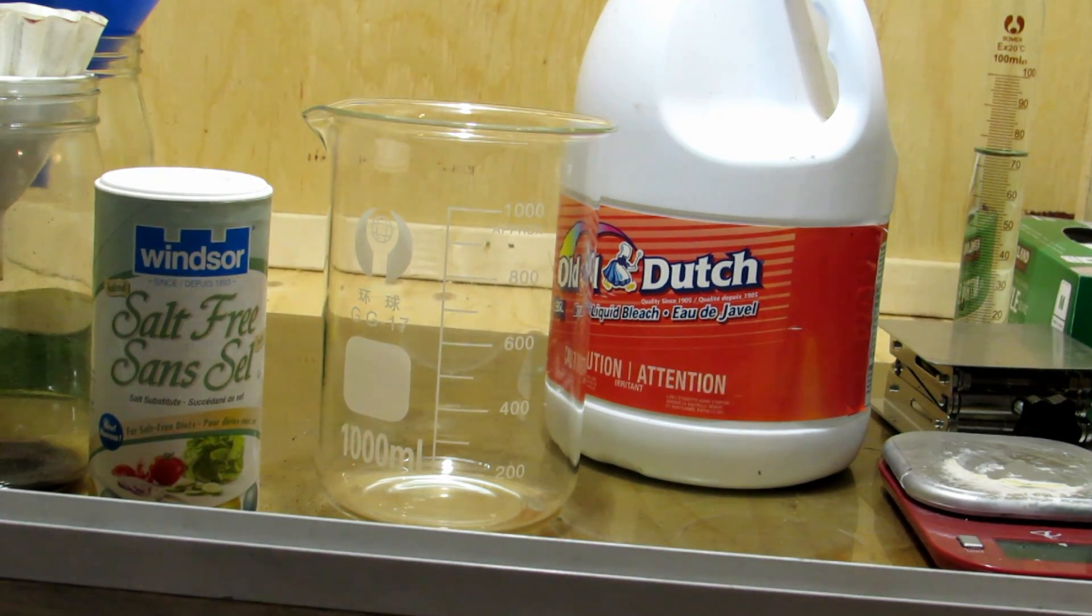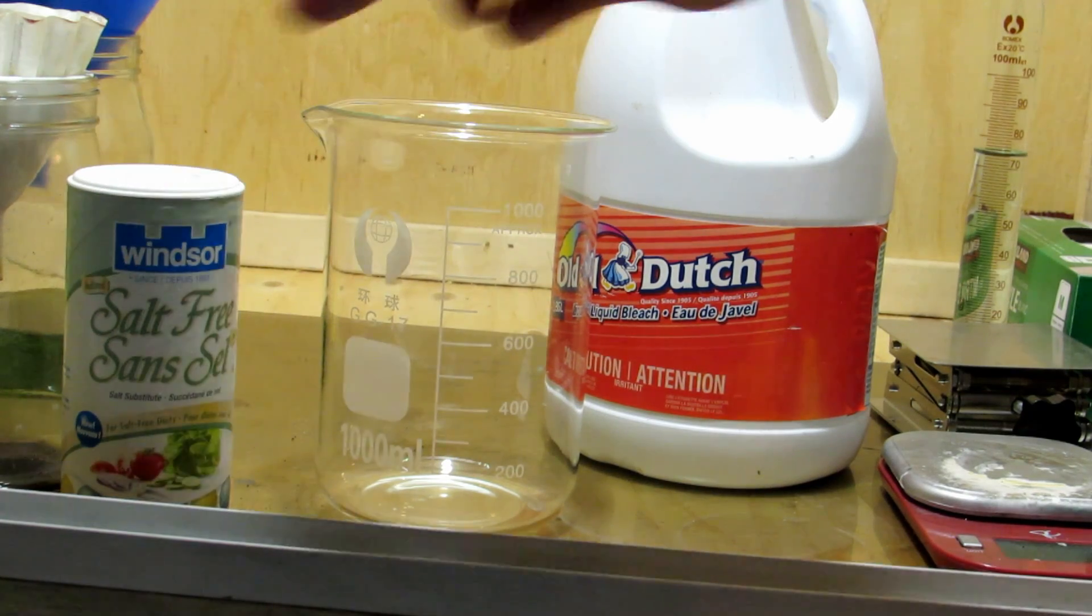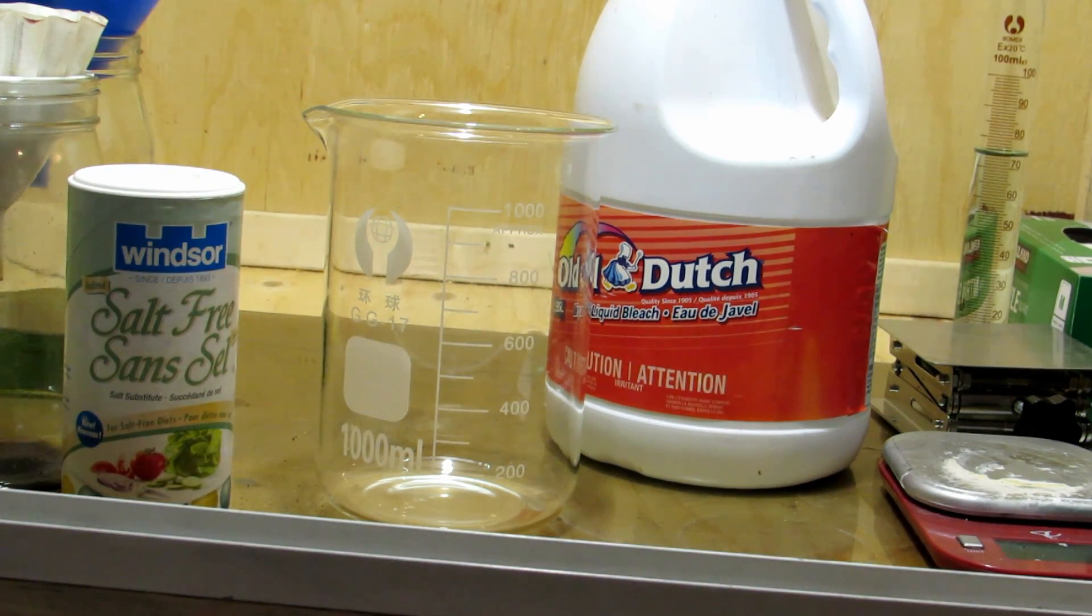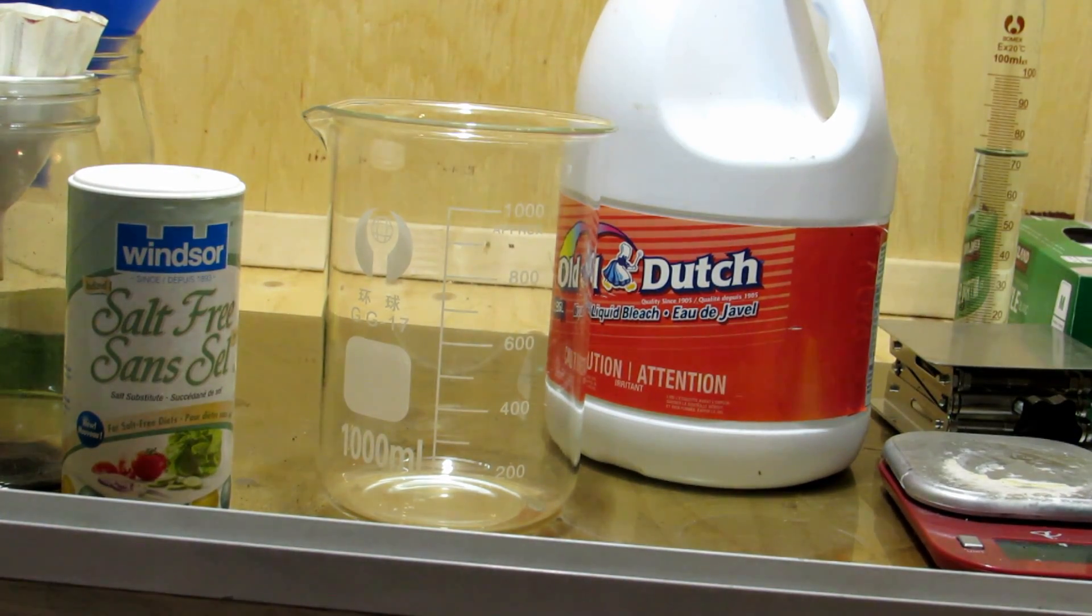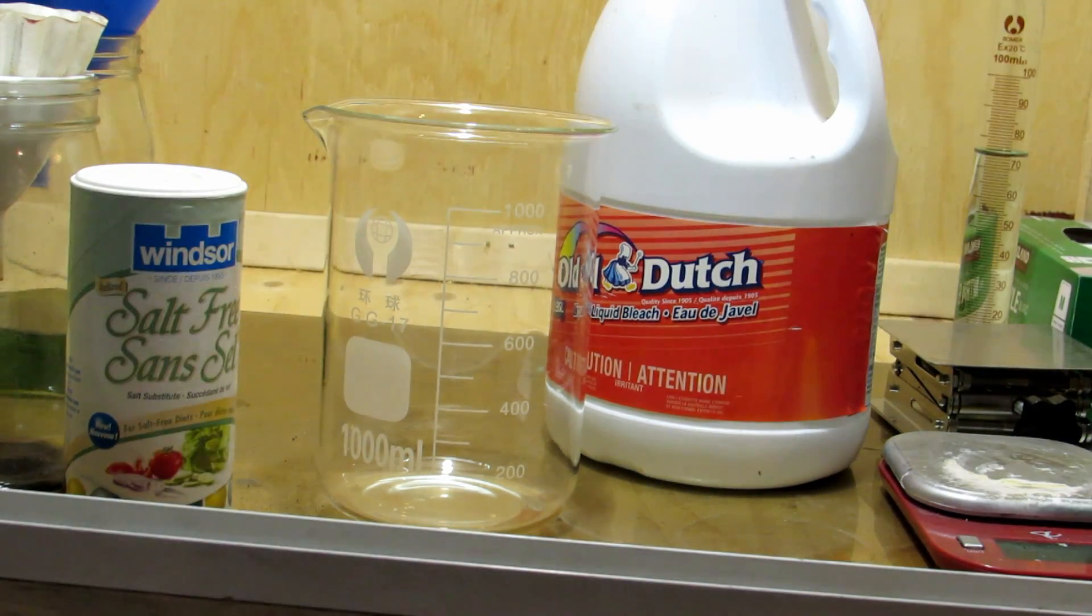This potassium chloride here can be found as salt-free salt at places like Thrifty's, or at home hardware you can buy huge bags of potassium chloride salt for salting your roads. A huge bag is like $20 there, which is incredibly cheap, considering this was $13 for 300 grams where you could buy 20 pounds for $20. I bought this before I knew I could get it so cheap somewhere else.